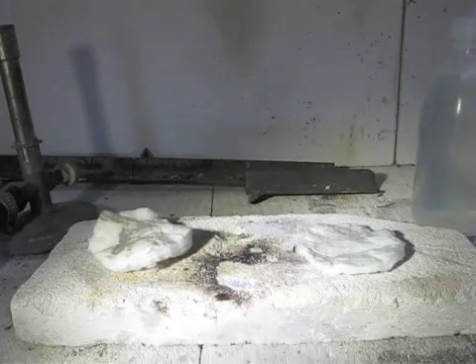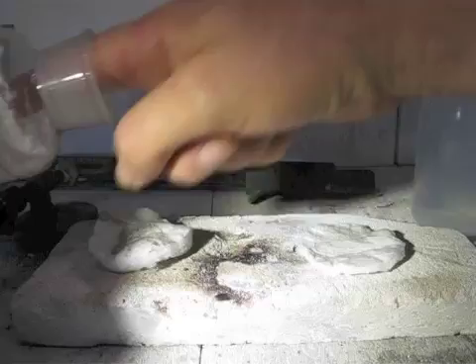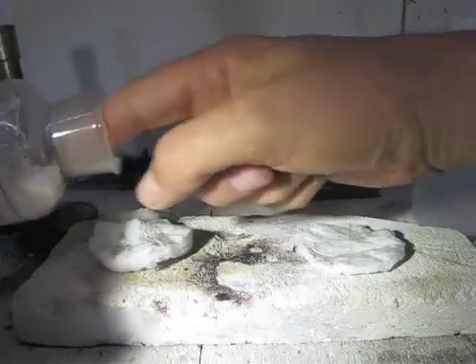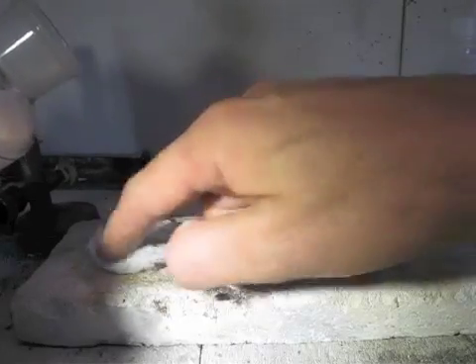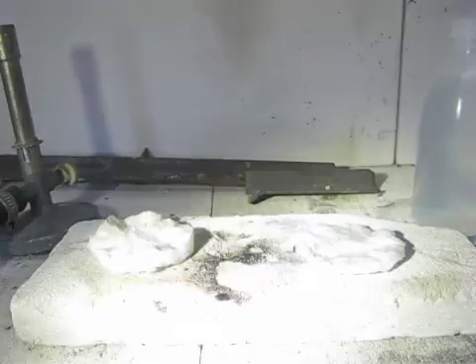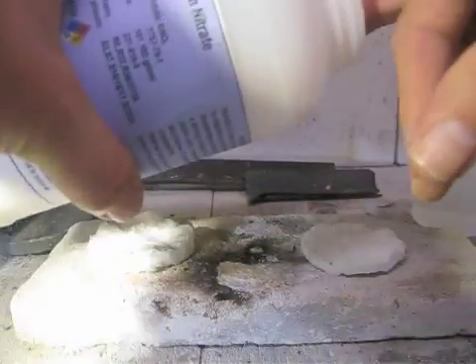Here I have potassium chlorate, and I put it on the left one. On the left one of both pieces, I put some potassium chlorate on it. And the other one, I put some potassium nitrate on it — you can see it here, potassium nitrate — and I put it here on the other one.